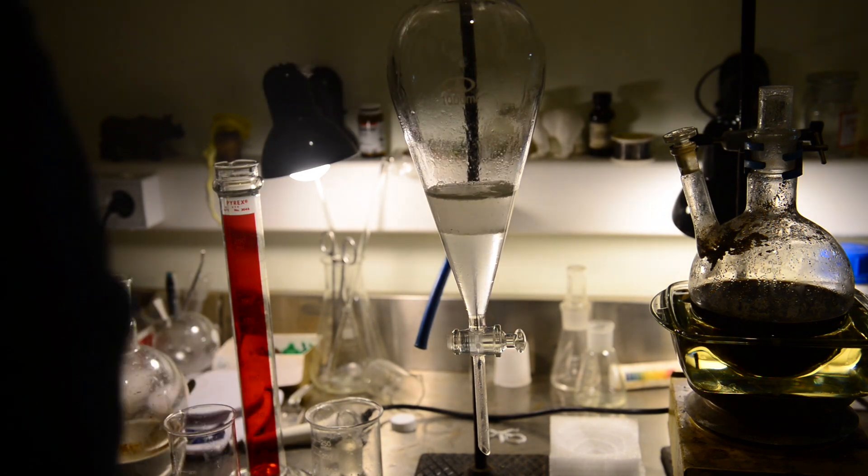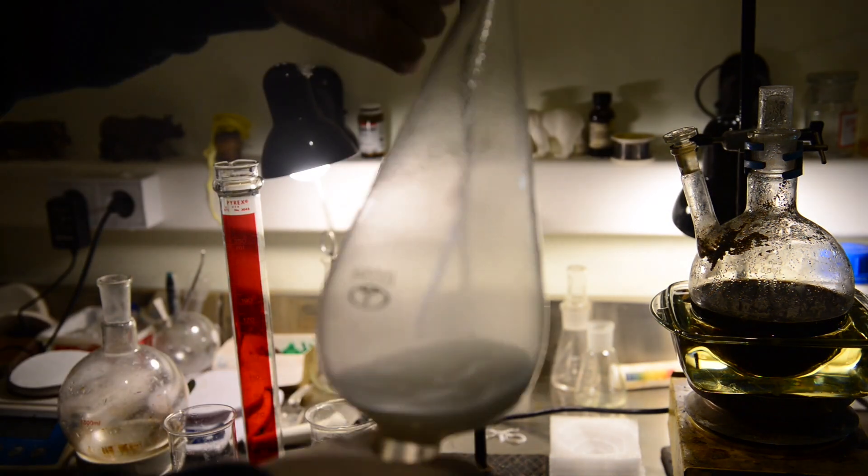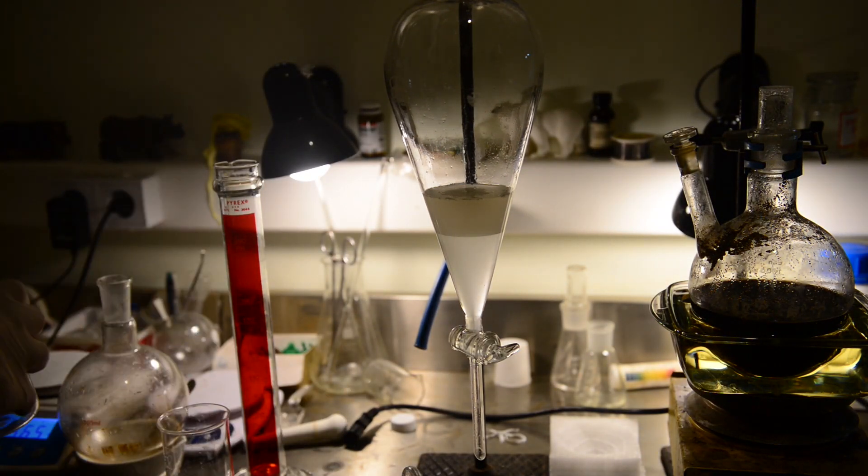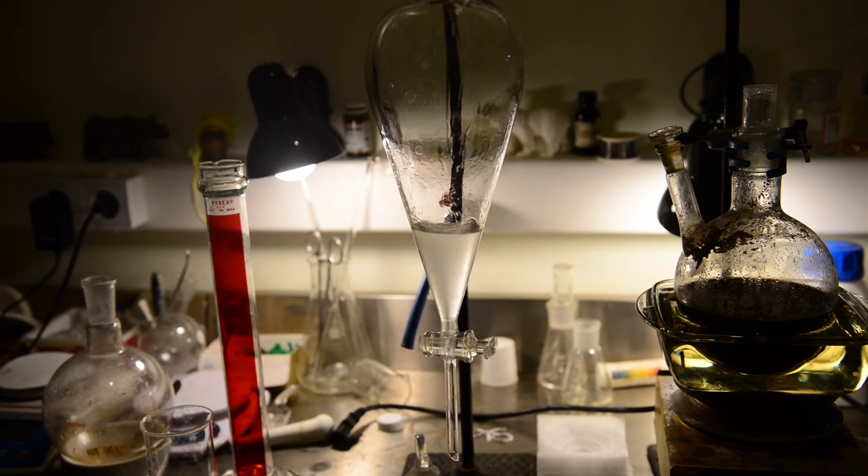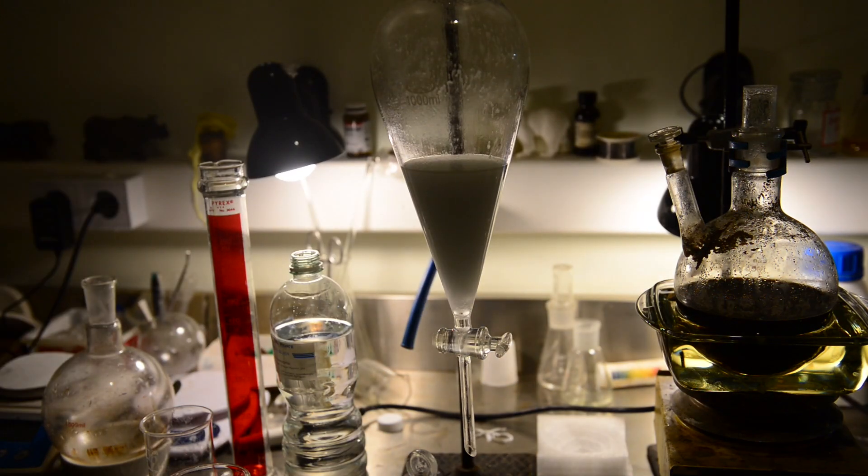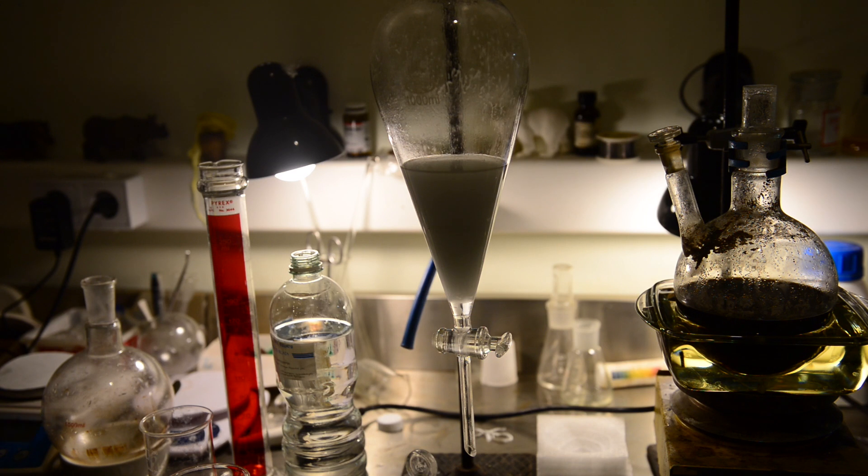There is no problem with the separation. Now we need to wash our DCM extracts with distilled water to remove sodium hydroxide. The liquid forms a much worse emulsion than last time. I think we can skip the second wash as it is too time-consuming. Adding sodium chloride might help with the separation but we haven't tried.